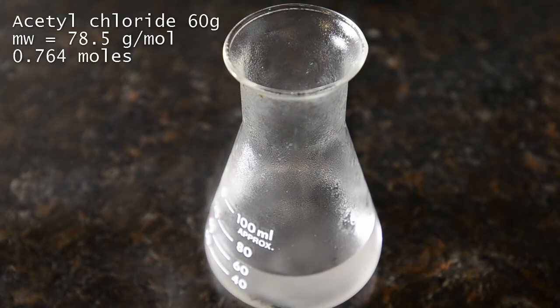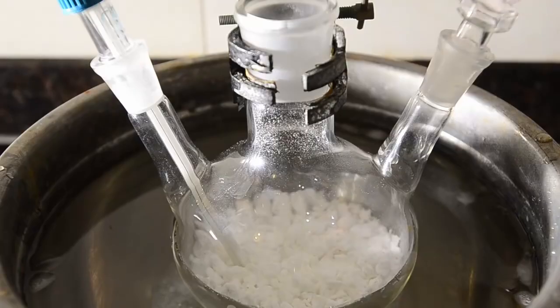Measure out 60 grams of chilled acetyl chloride, this is about 55 ml of liquid. As you can see, you'll need ventilation here.